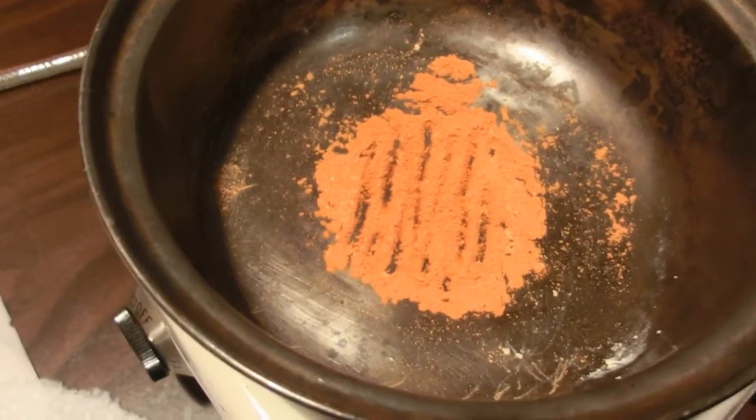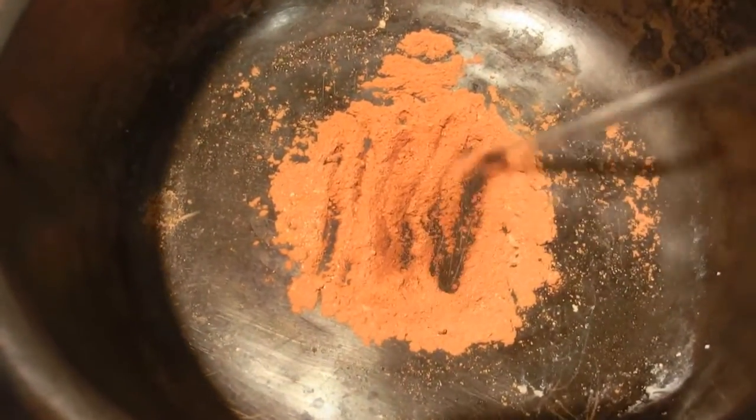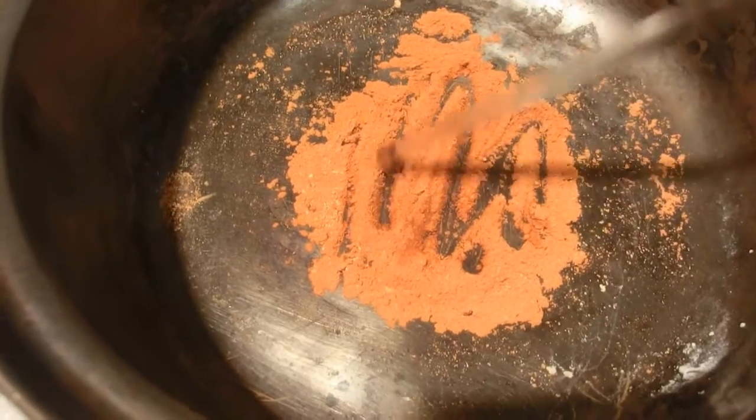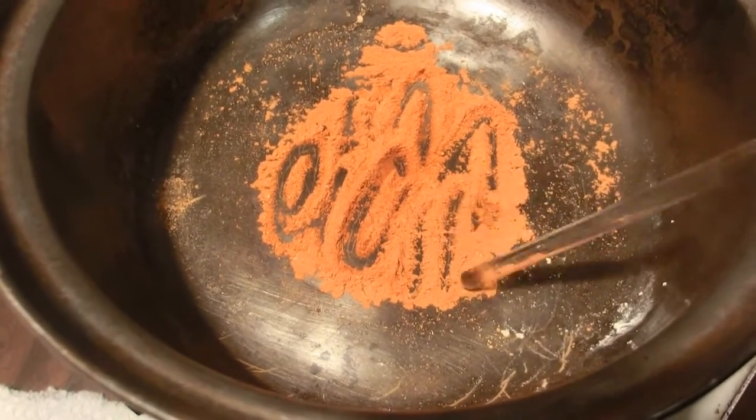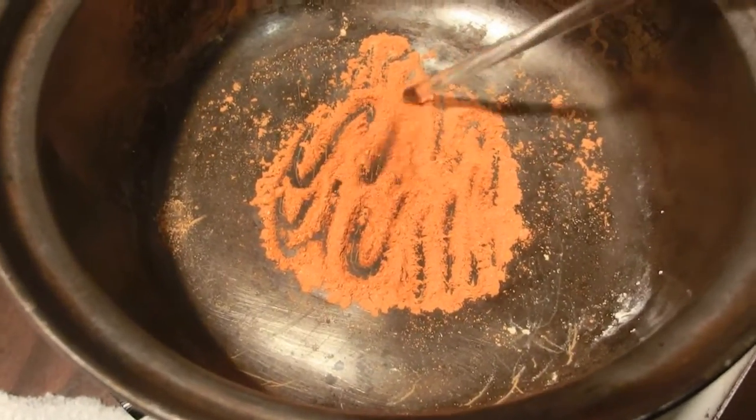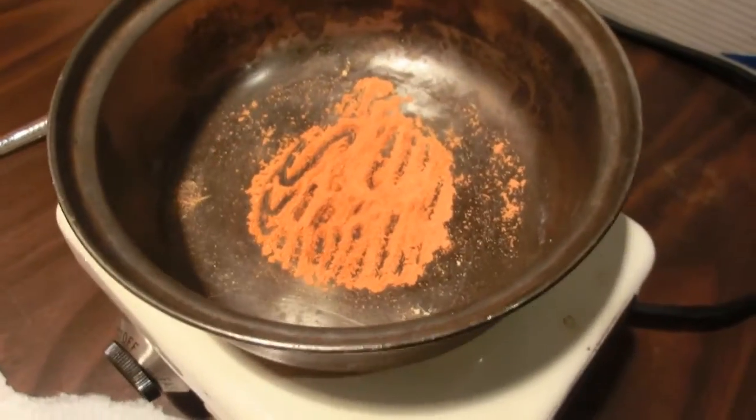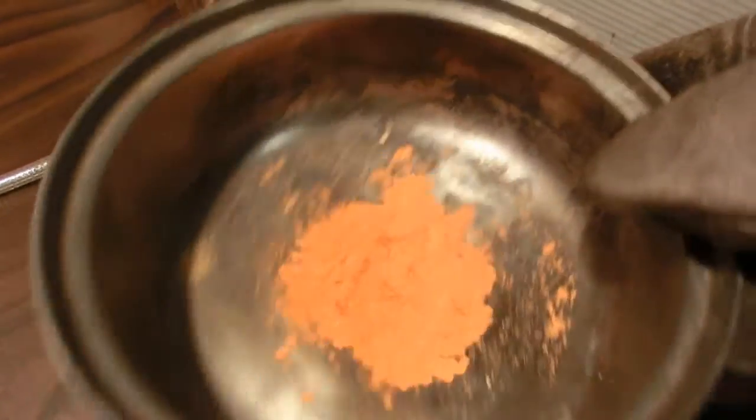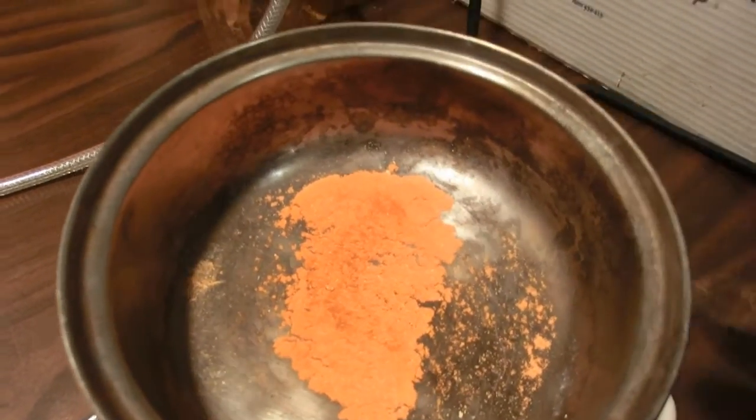This is after some time of heating. As you can see, it's turning a nice orange color and I got to keep it stirred to make sure it has even heating throughout the powder.